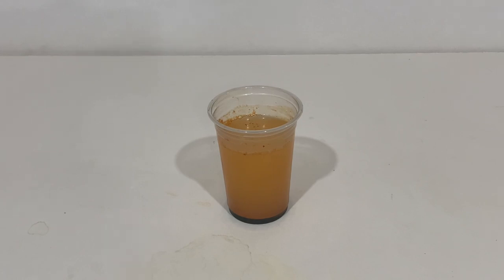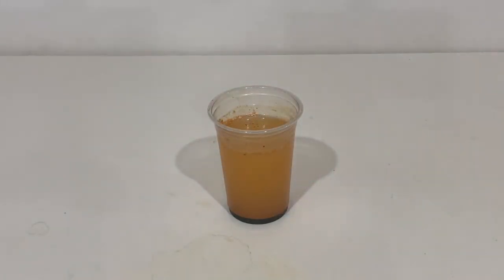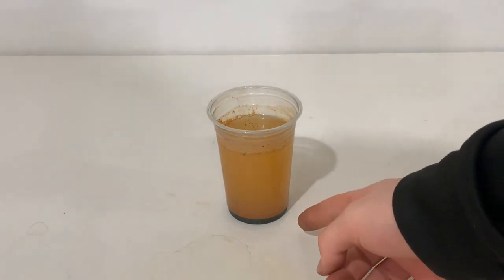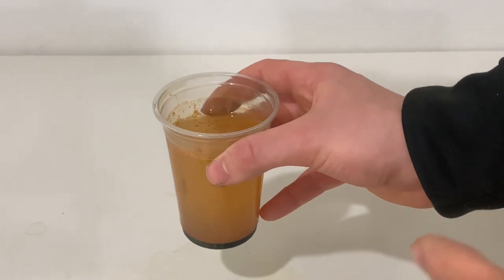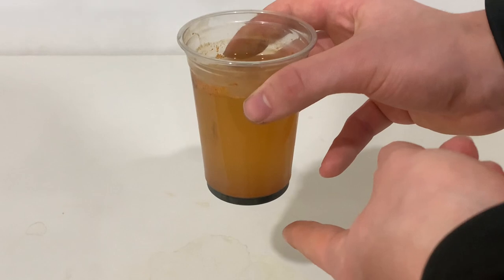We left this thing on for a few hours — I left the potion to brew — and that's not the color it's supposed to be. As you can see, it's mostly orange, which is exactly what we need. However, at the bottom there is a lot of green. I managed to get enough for a good thermite reaction. I'll get a lot more iron hydroxide, iron carbonate, and iron oxide from this reaction than if I was using copper instead of iron, as iron is far more reactive than copper. However, copper thermite should be a lot more reactive because it has more potential energy inside of the molecule — that's the law of conservation of energy in practice. Here in this cup I have a lot of iron-3-hydroxide (the orange stuff) and a lot of iron-2-hydroxide (the green stuff) at the bottom.